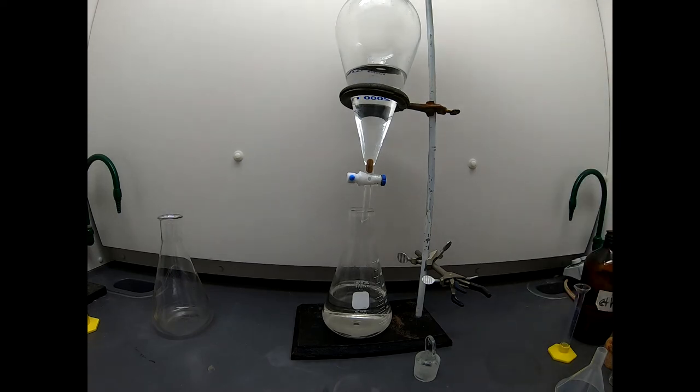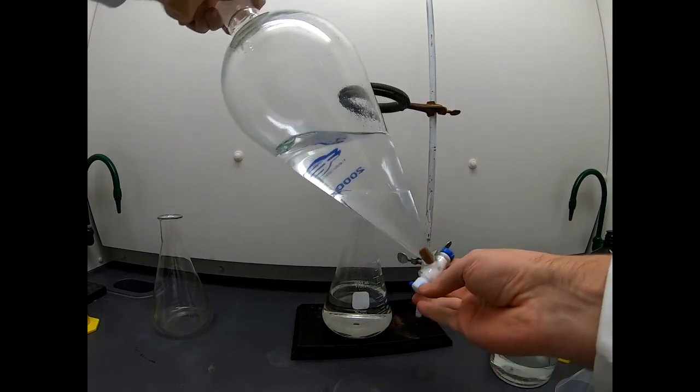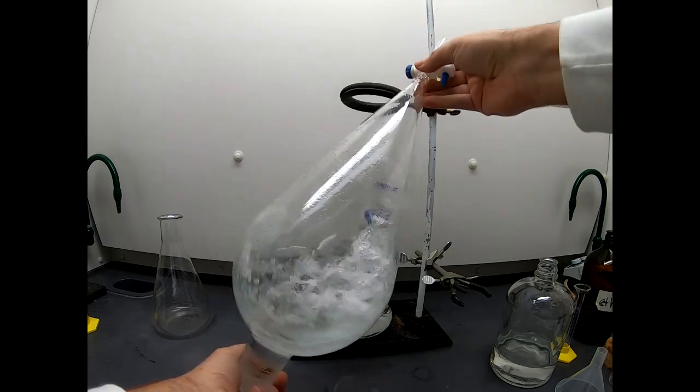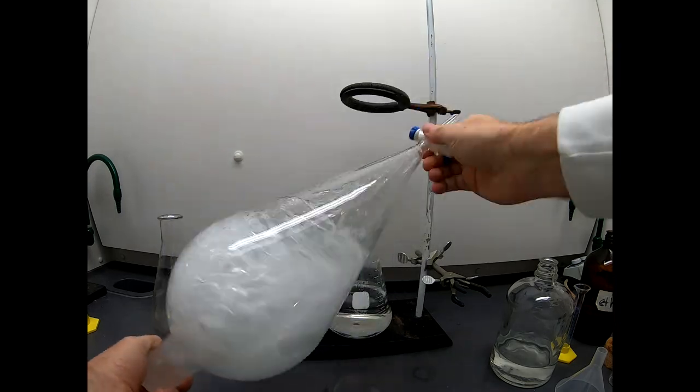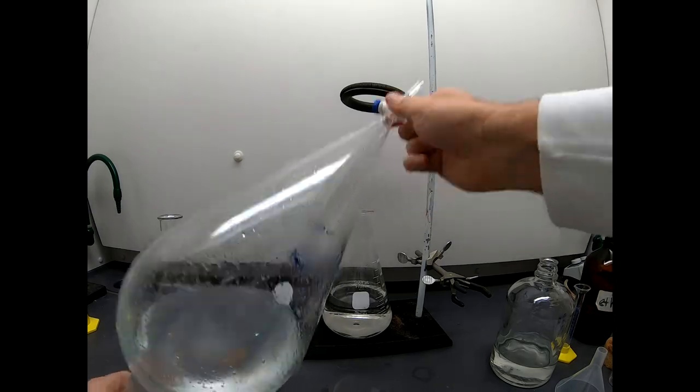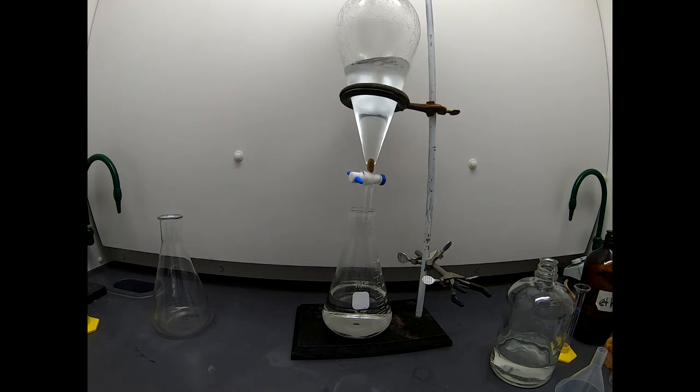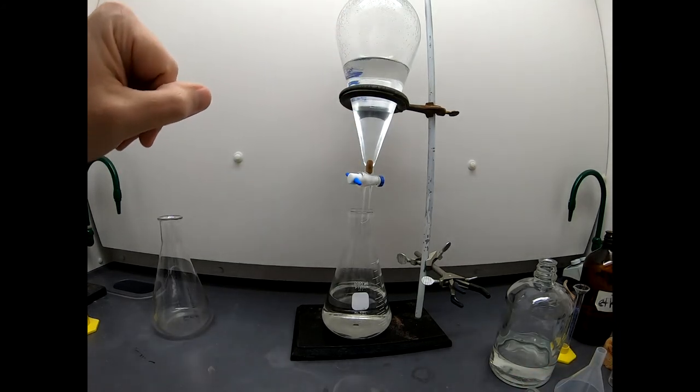Okay. Well, let's do one more of these. I'm actually going to do four more of these. I'm going to use multiple washes with water. I won't use as much water this second time. The first extraction does most of the work. Put the top on. Bring this back down in frame. Let's turn it upside down. Not shaking. Oh boy, look at that vent. So we let it vent a little bit. Swirl it around. Let it vent all that it wants. And now when we shake it up, it won't build up quite as much pressure. A little bit. Not too much. Okay. And you want to always point this stuff away from people so you don't spray them. Because remember, we have some different reagents in here. We have some azide in here.